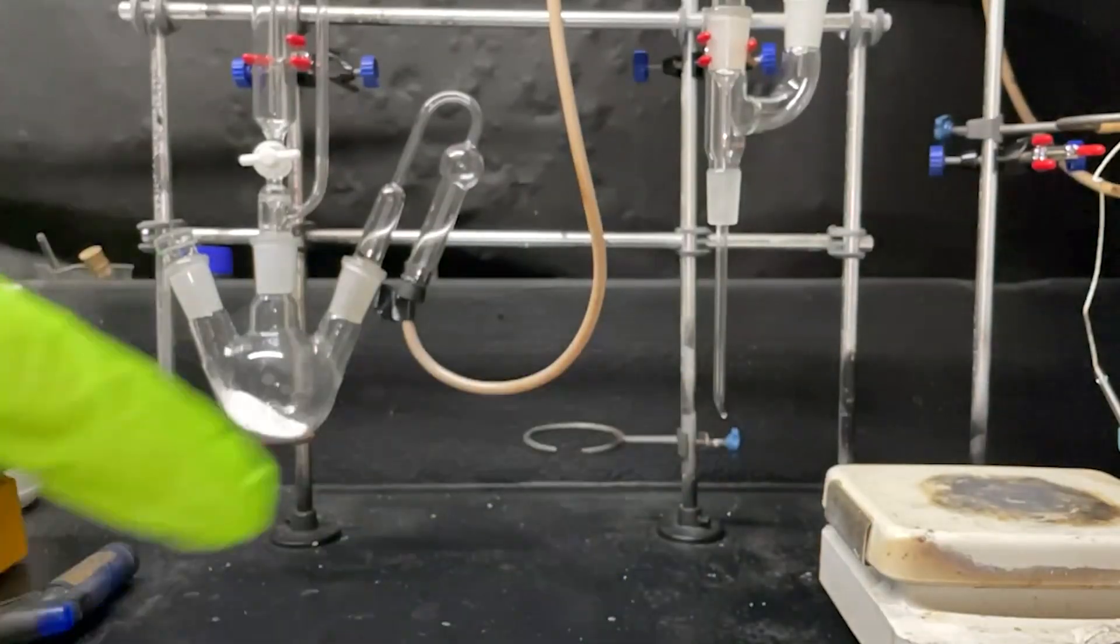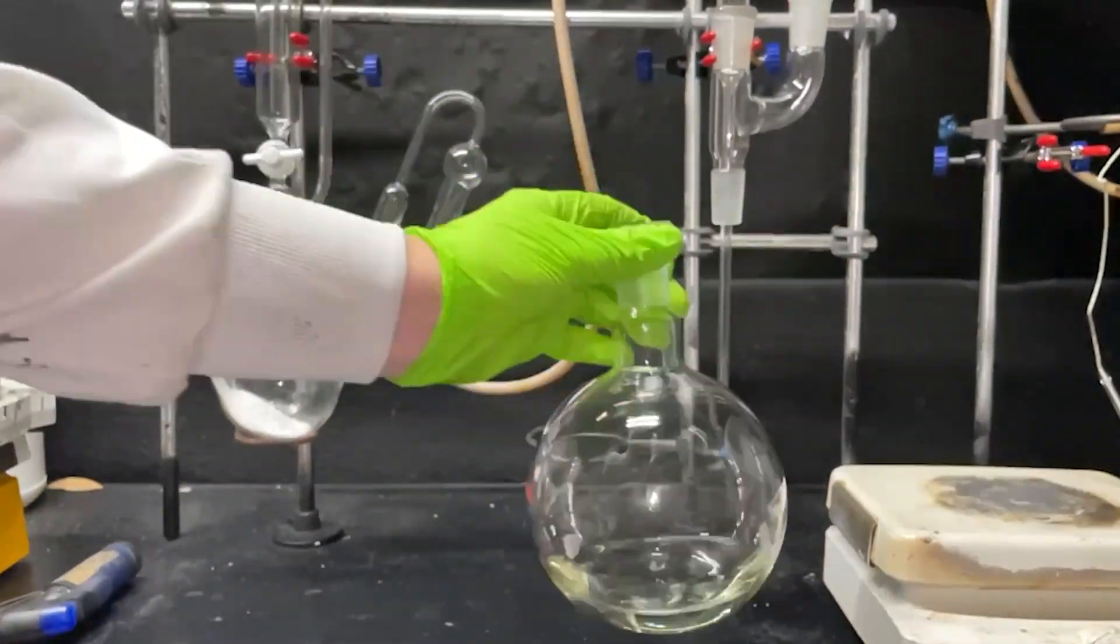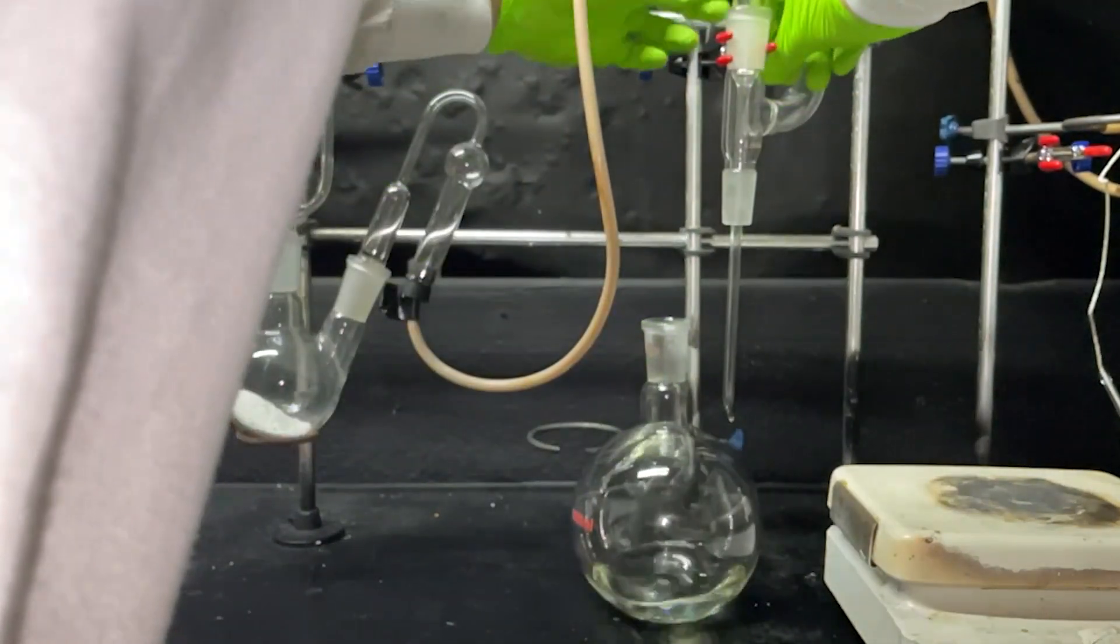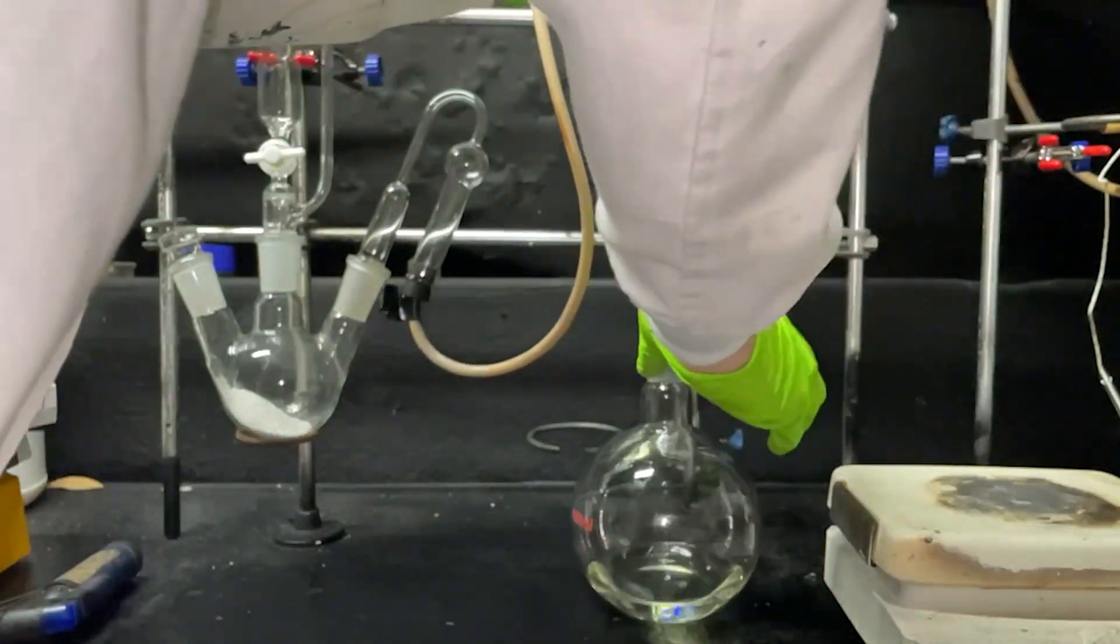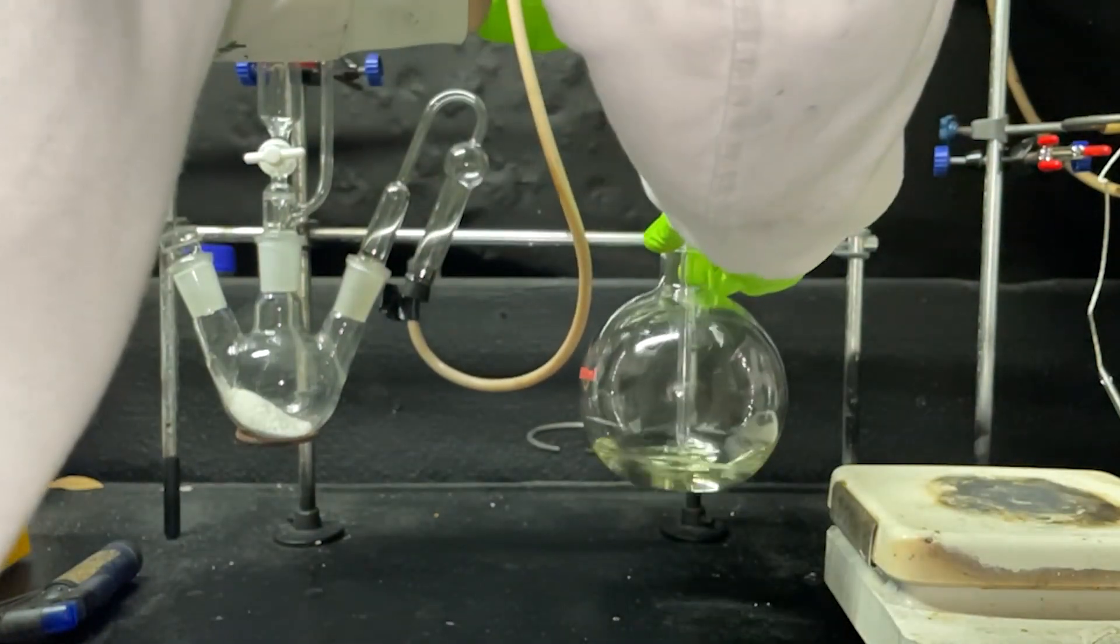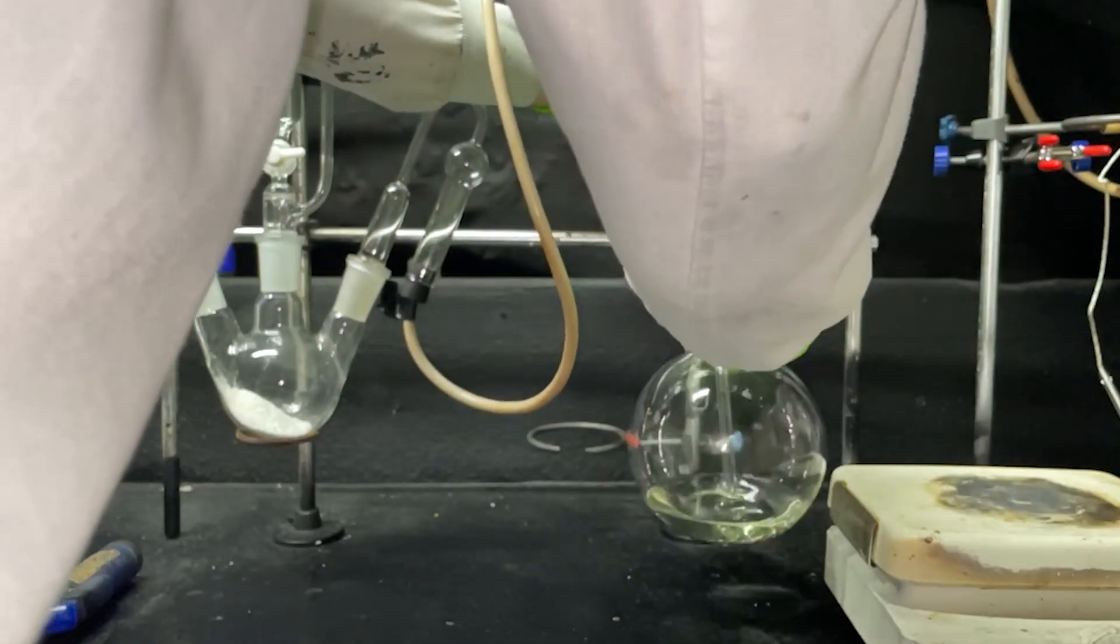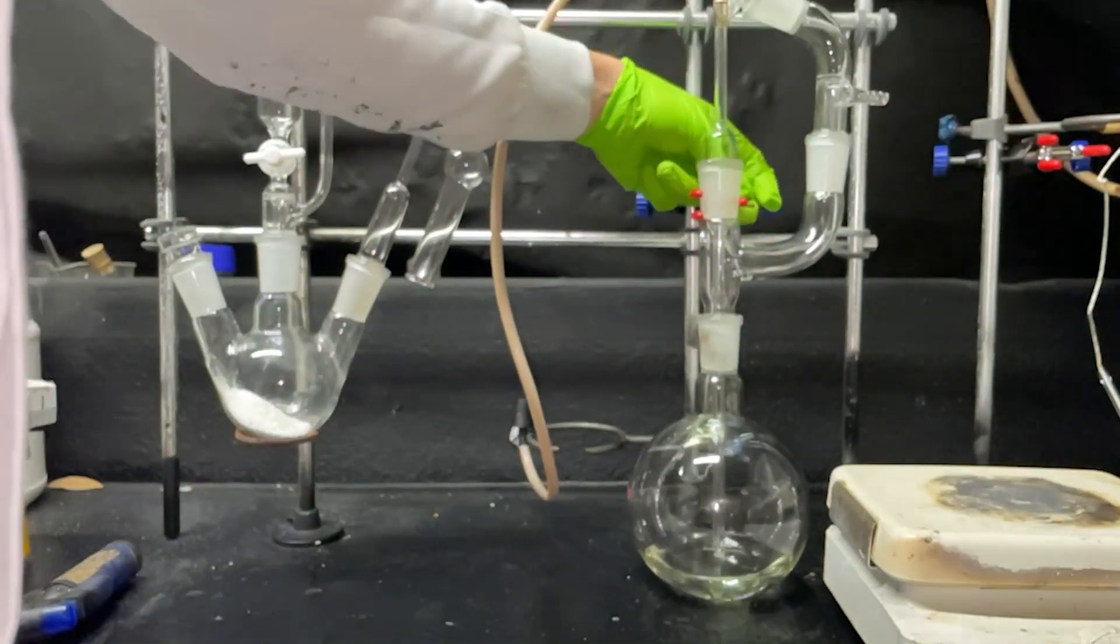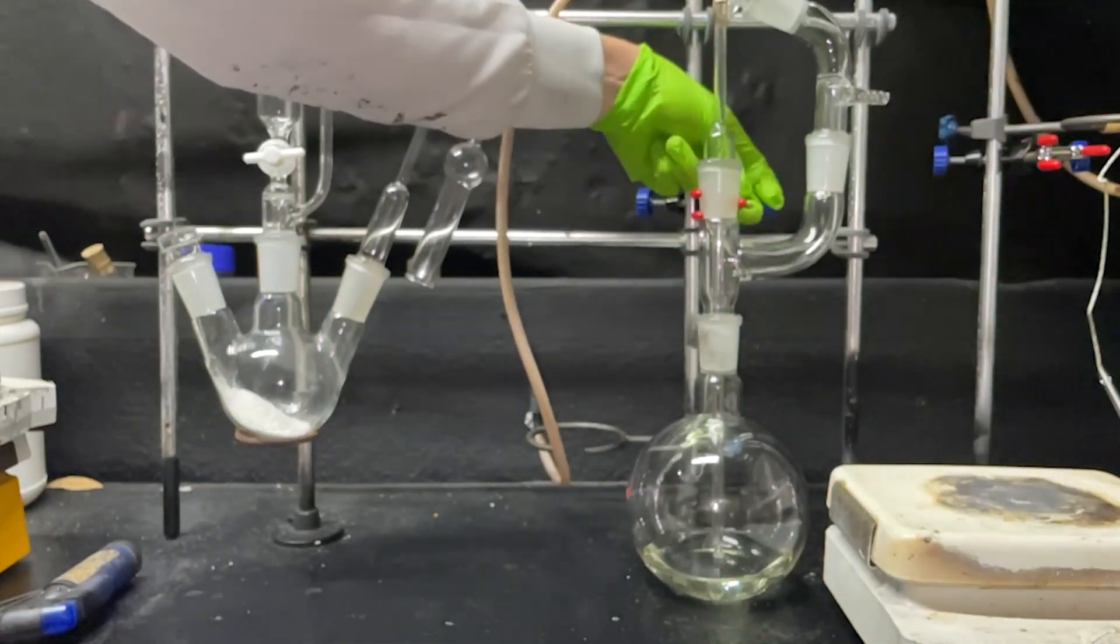Okay we're almost ready to start making our mace but the next step we got to do is attach our bubbler to our flask. Get that open for me. Attach our bubbler to our flask containing our acetic acid and acetophenone.